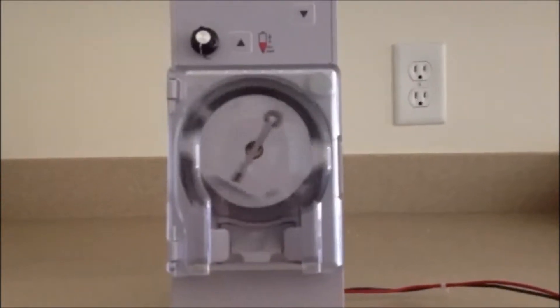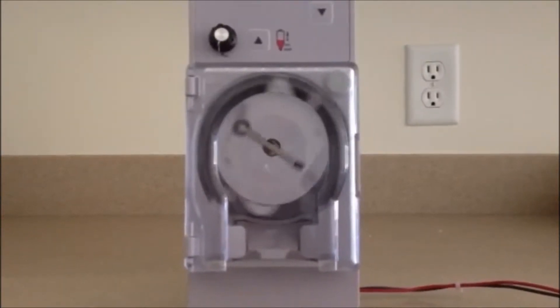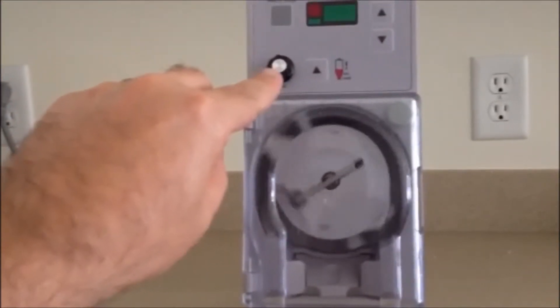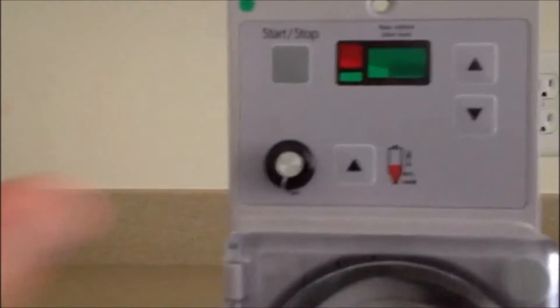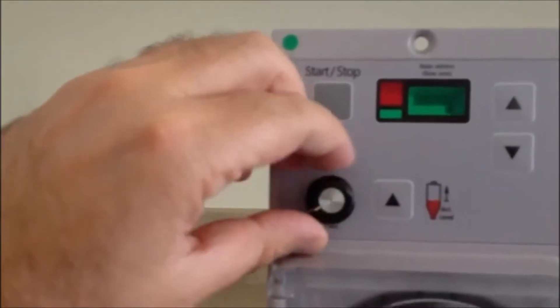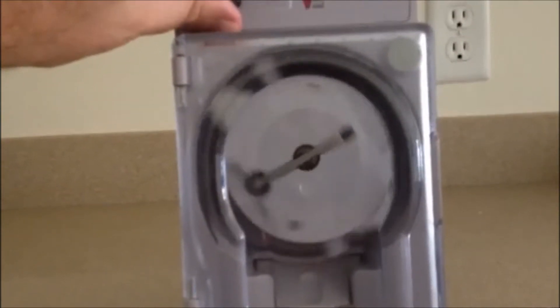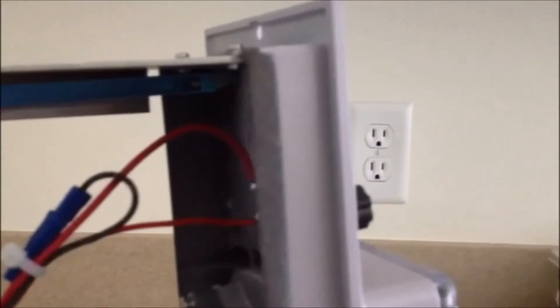You would no longer depend on the blood pressure to propel the blood from the body into the filter and back into the body. This piece right here is a resistor that can work in a way where as we twist it, we can reduce the resistance and the pump speed will excel. You can get that at Radio Shack for $3, and this is the back of the pump where you can utilize the connection.